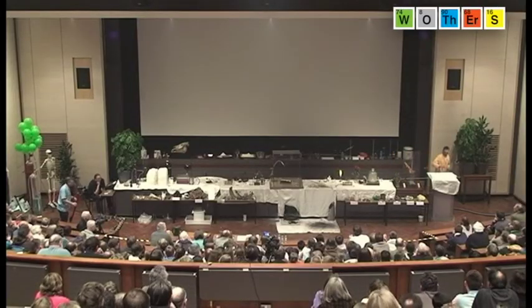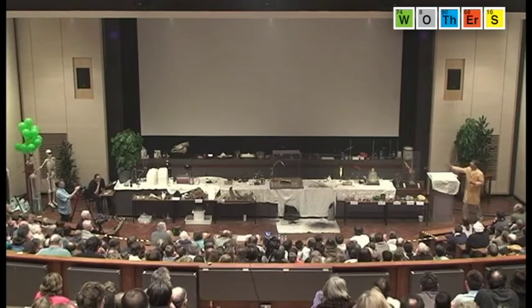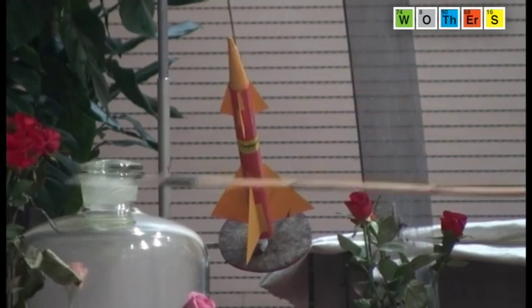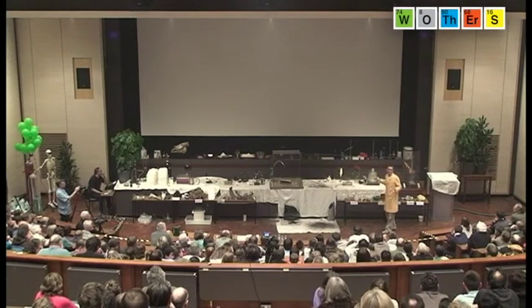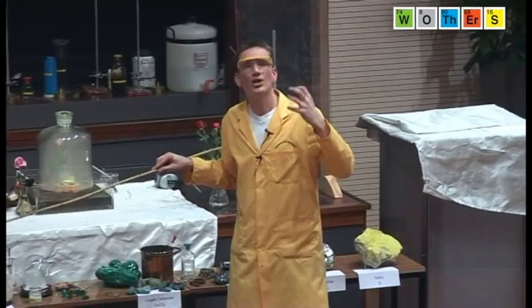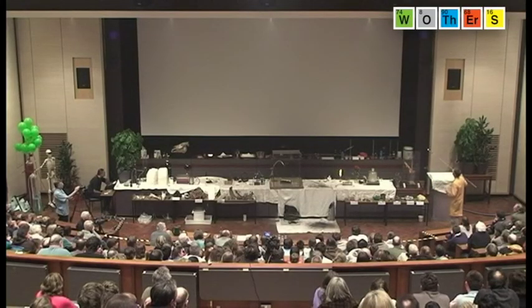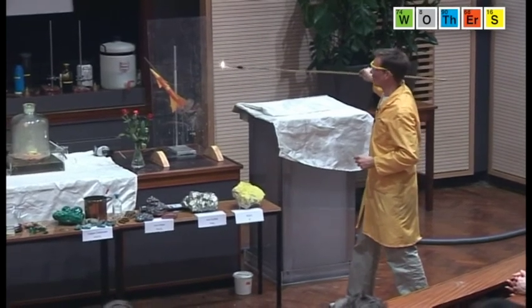Now, I've got a couple more reactions just to finish with. We have a rocket here, and this rocket has been filled with nitrocellulose. Cellulose is actually just cotton essentially, and we've treated this with nitric acid and sulphuric acid to lock into the structure some of these nitro groups, and this causes it to burn very, very violently. So hopefully it should be able to launch our rocket.